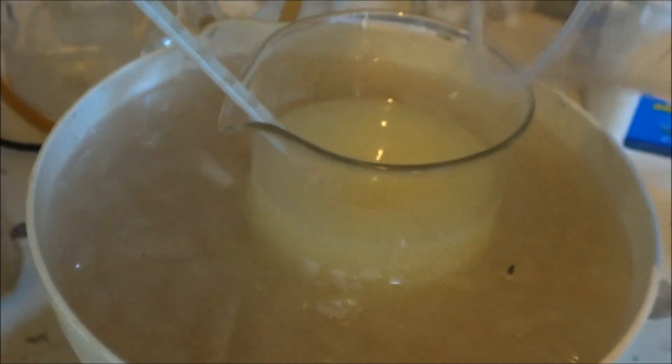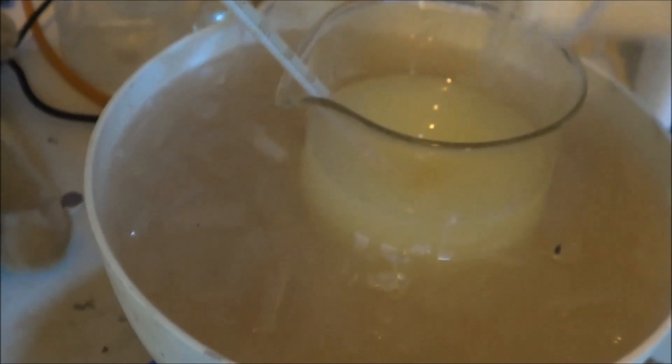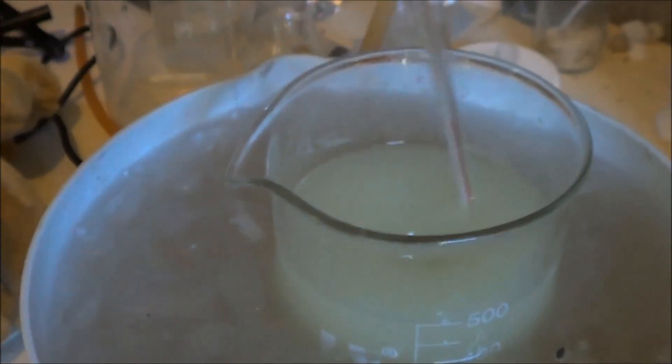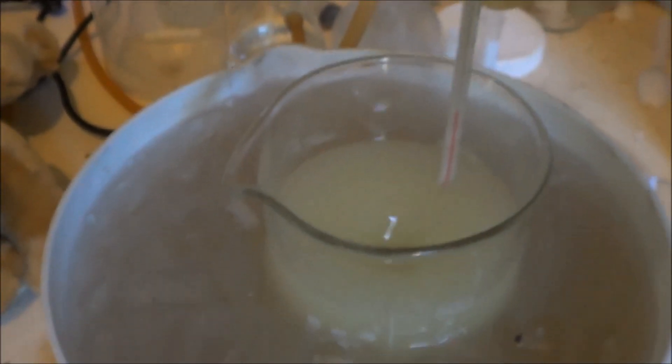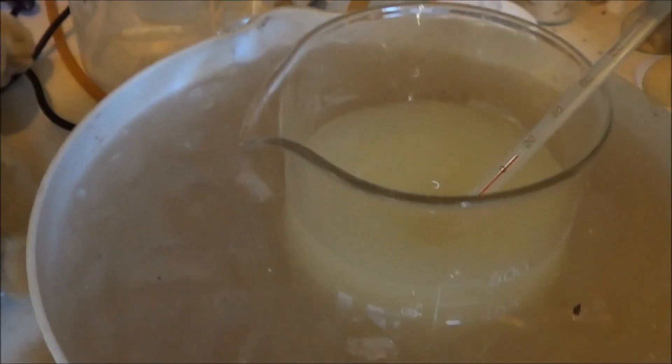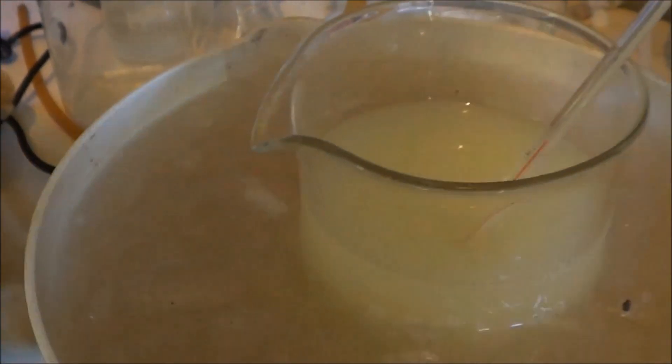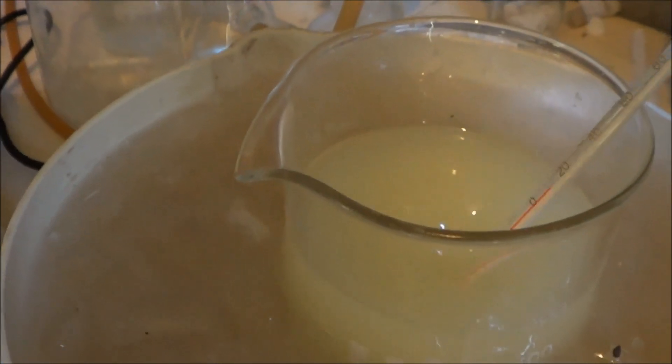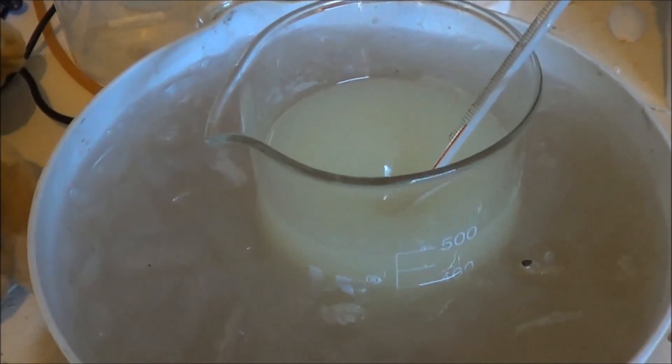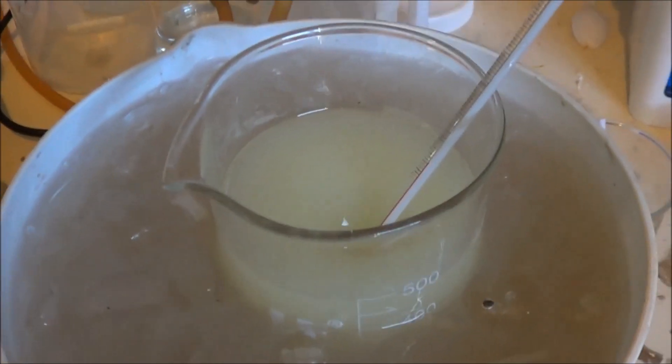I'm still adding the rest of this sodium hydroxide slowly to prevent it overheating. About 15 degrees is about where we want a maximum. It's been getting up to 20, which isn't very good, but I don't really have all day. Well, I mean, I've been doing this all day, but you know, I don't really have all night.